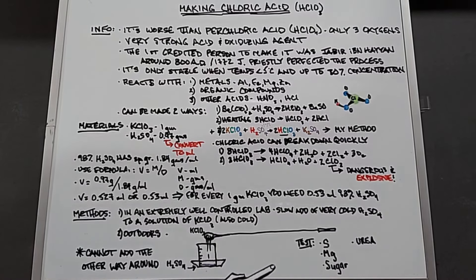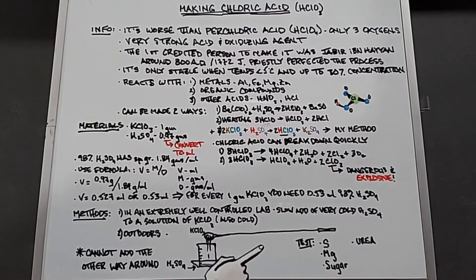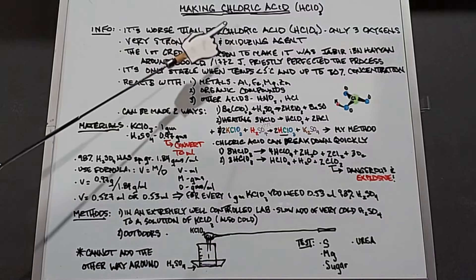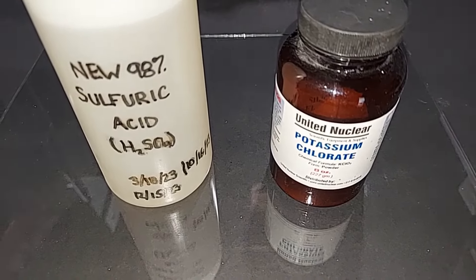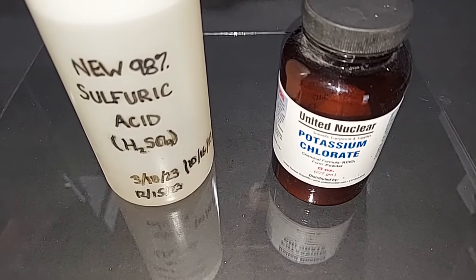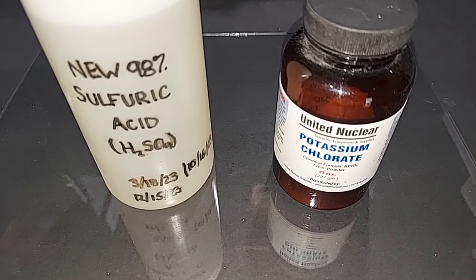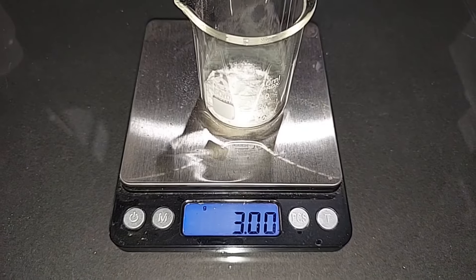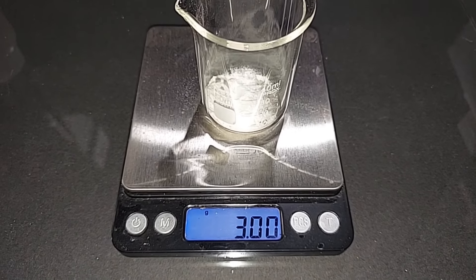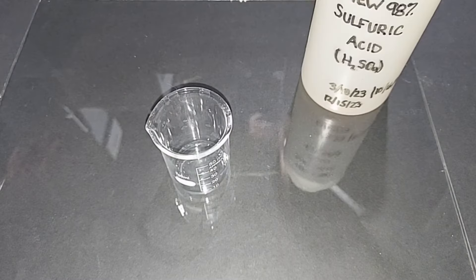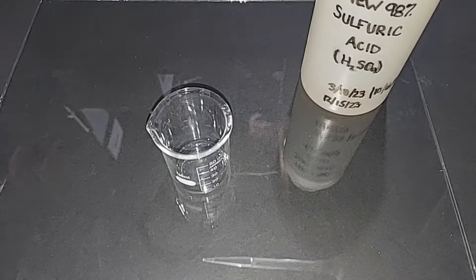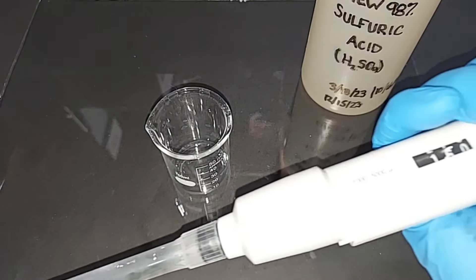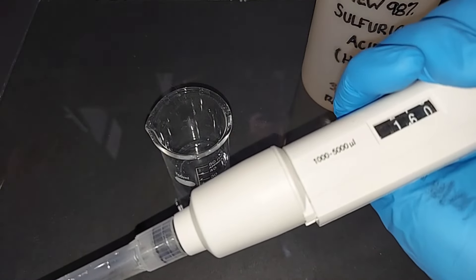This promises to be a really energetic experiment. Let's go ahead and make our chloric acid. As discussed, these are the two things we need: 98% sulfuric acid and potassium chlorate. To start, here is three grams of potassium chlorate pre-weighed, and 0.53 times three is 1.59, I've got this at 1.6, close enough.